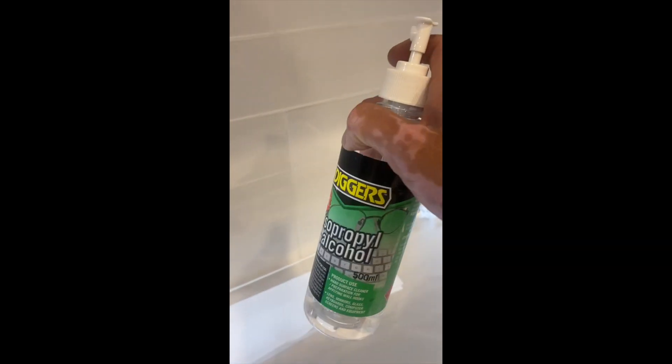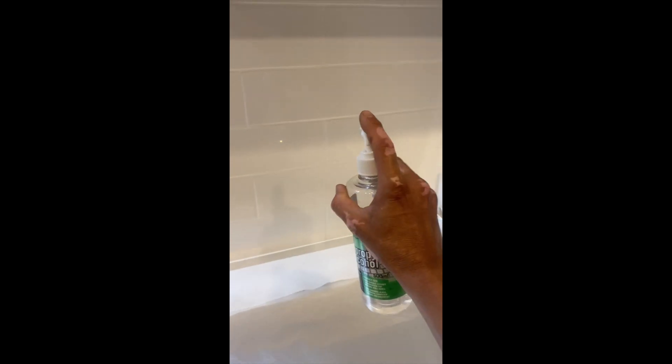What we just want to do is get our isopropyl alcohol and spray even on the top, on the walls, get a little mist to the bottom. I will be back in a second when I set this camera up.